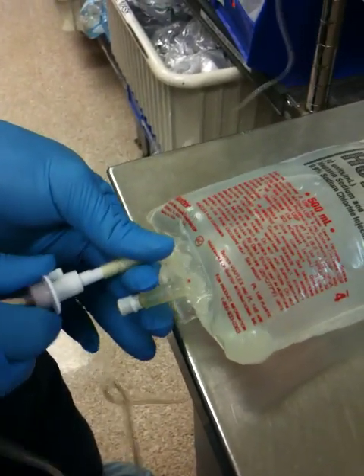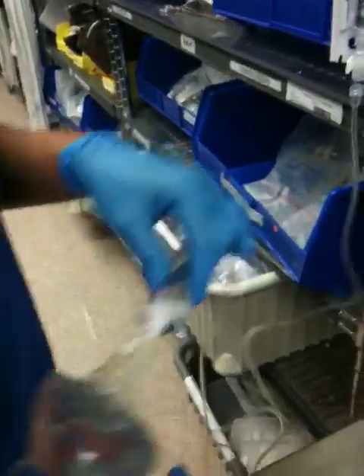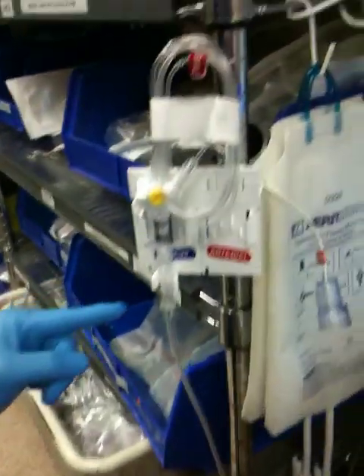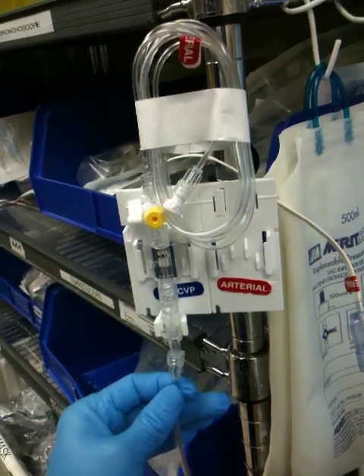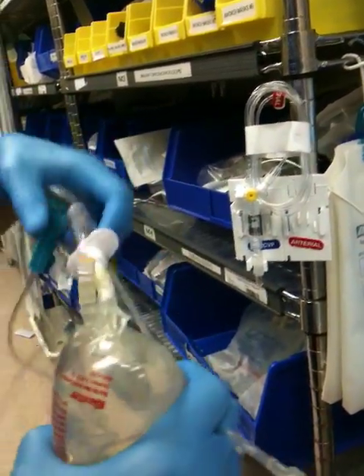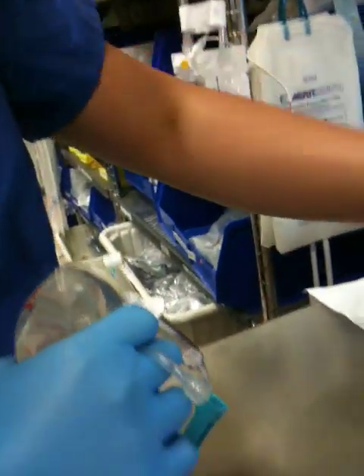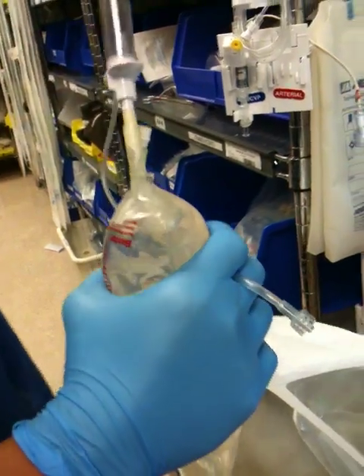Notice that I'm not going to touch the spike at all. This requires a little bit more technique here. While I'm still holding this in my right hand, I'm just going to take this off here. Look at my hand here while I'm still holding — I'm going to grasp it like that. I'm going to stay right here and use this as a basin.